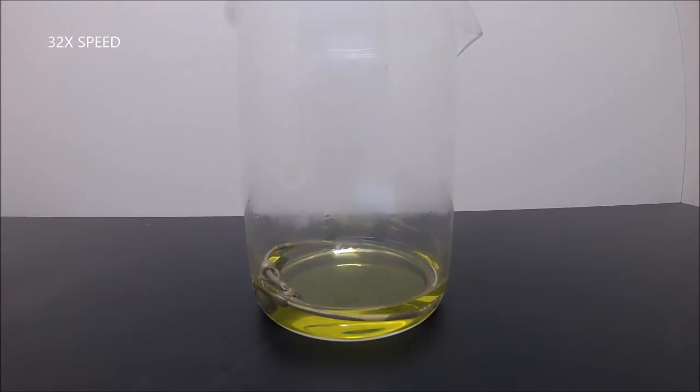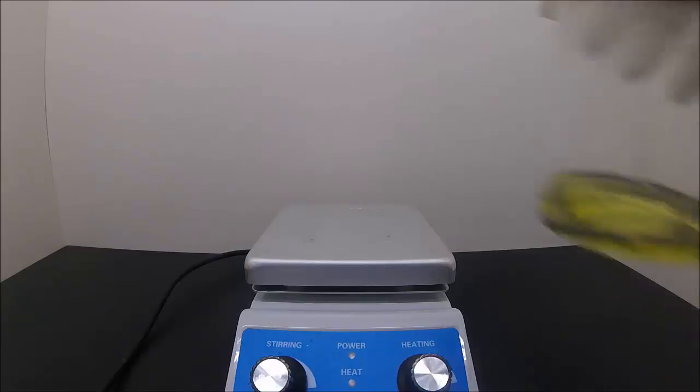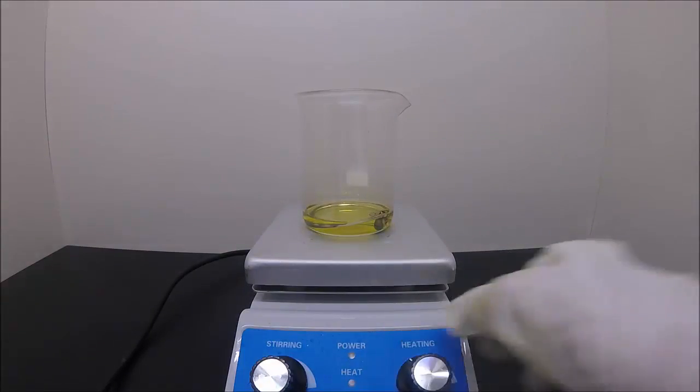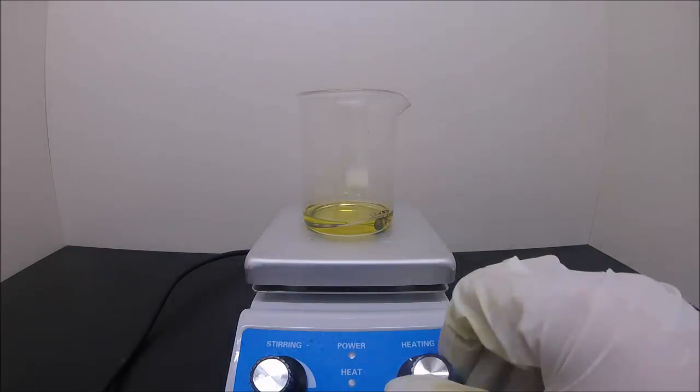To speed things up, we're gonna have to apply some heat. The beaker is then placed on a hot plate, and the heat is switched on. Well, something is wrong.